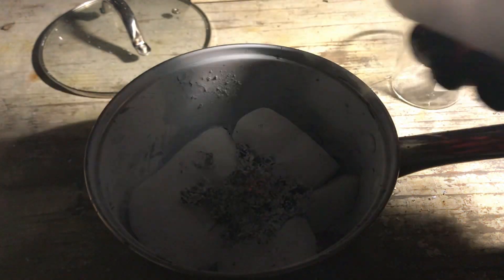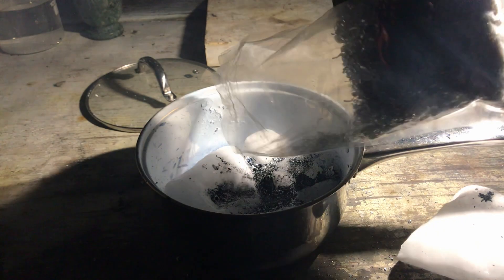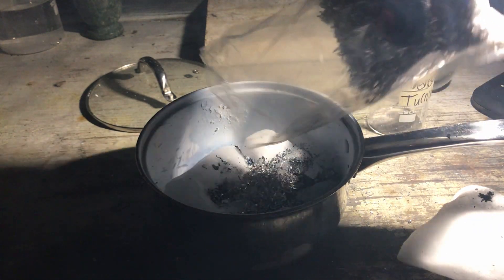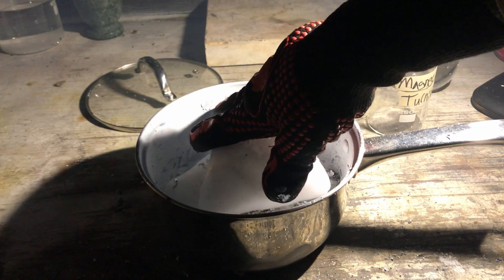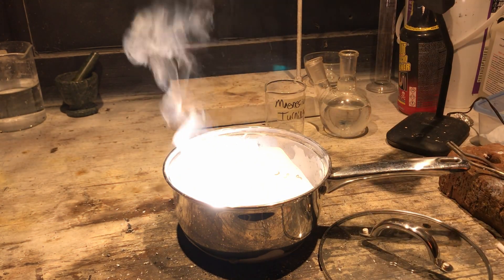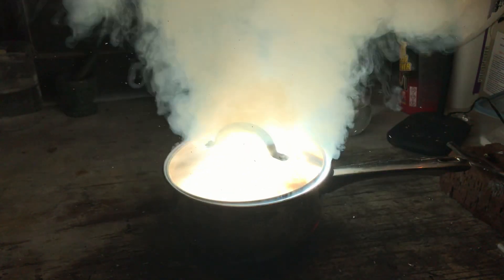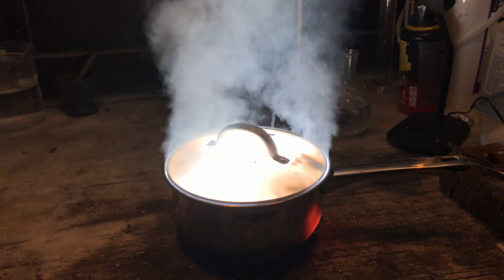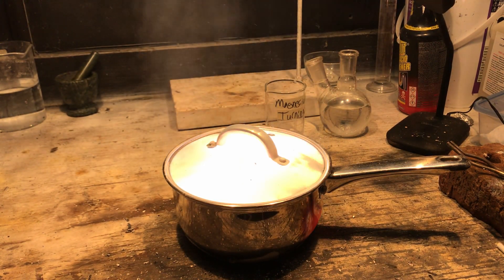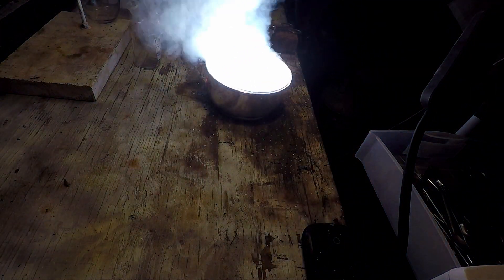After cleaning off the carbon residue, I do one last hurrah — a big pile of magnesium turnings inside the cavities between the two blocks. My propane blowtorch had run out of fuel, so I used my giant burner from the actual main tank, which is not recommended but was interesting. I put the lid on, and it's important to note that this entire reaction comes only from the magnesium and the carbon dioxide — no air from the outside world. I find that fascinating: carbon dioxide is acting as the oxidizer here.